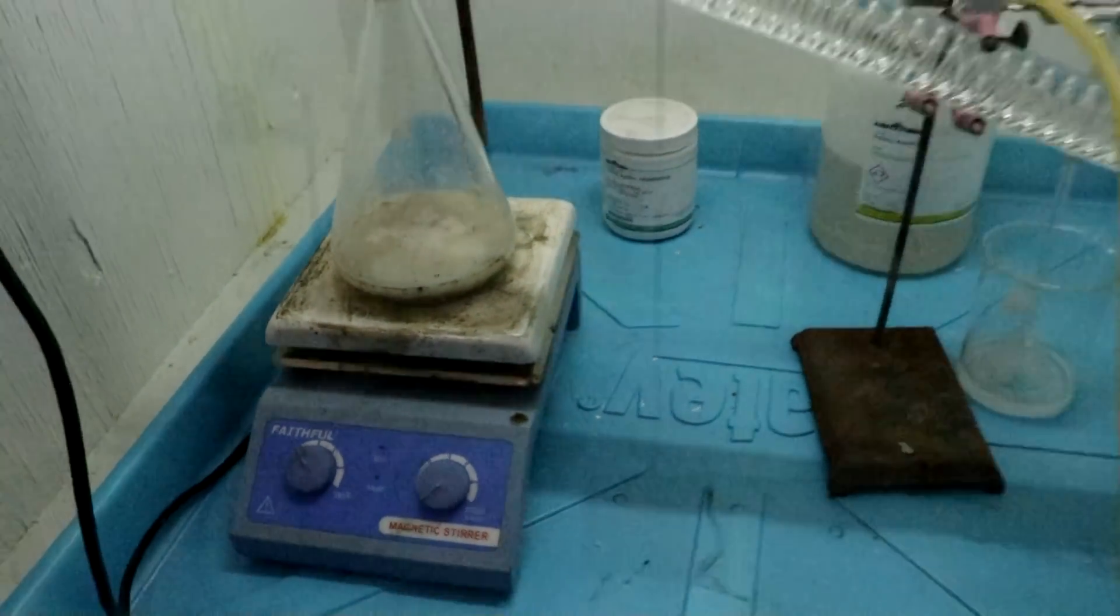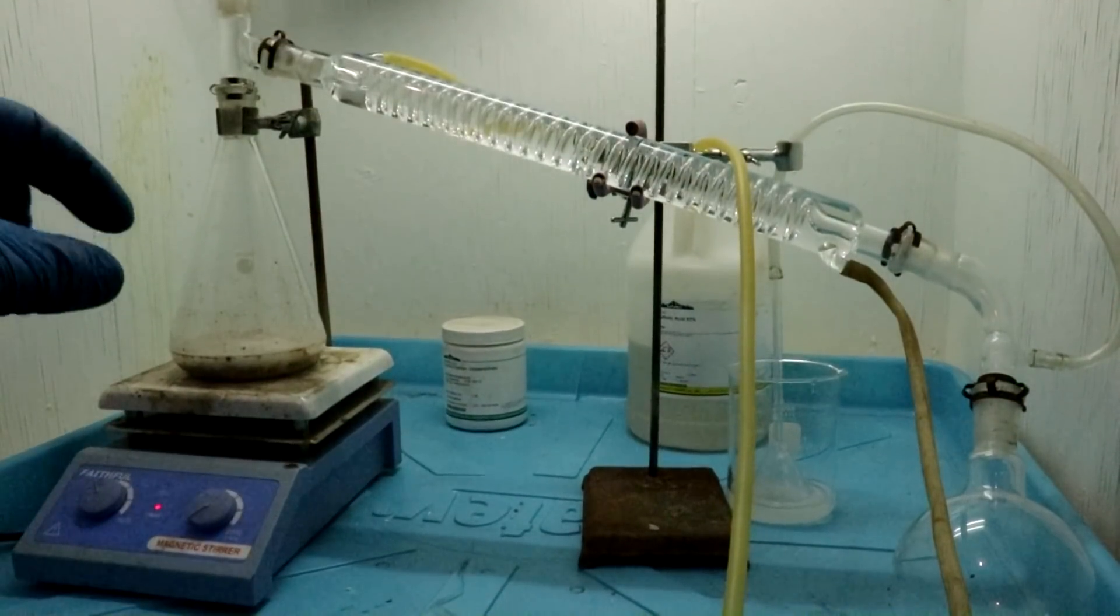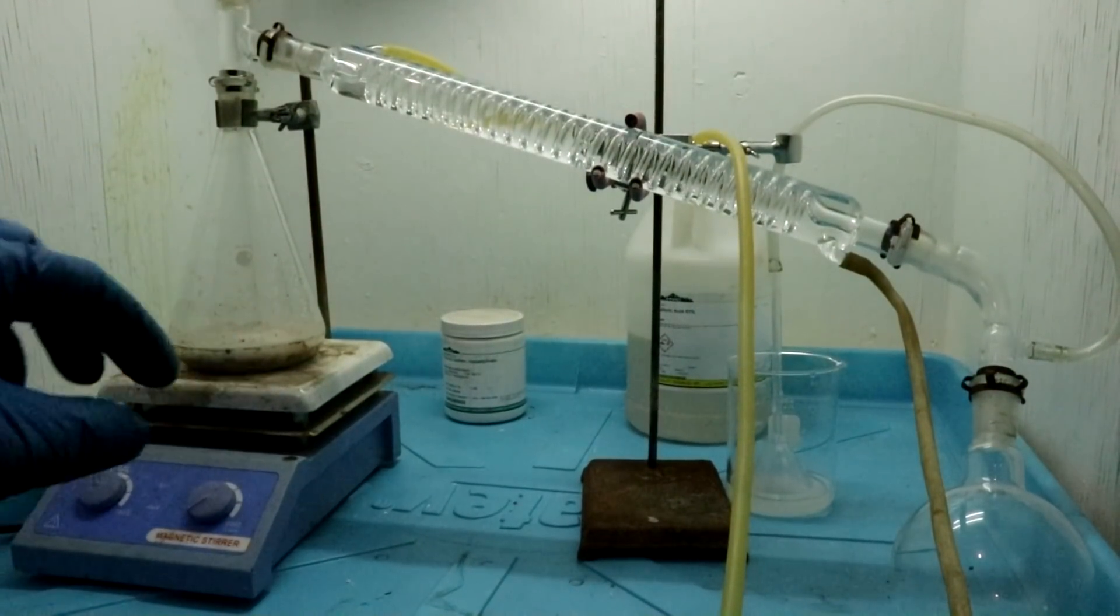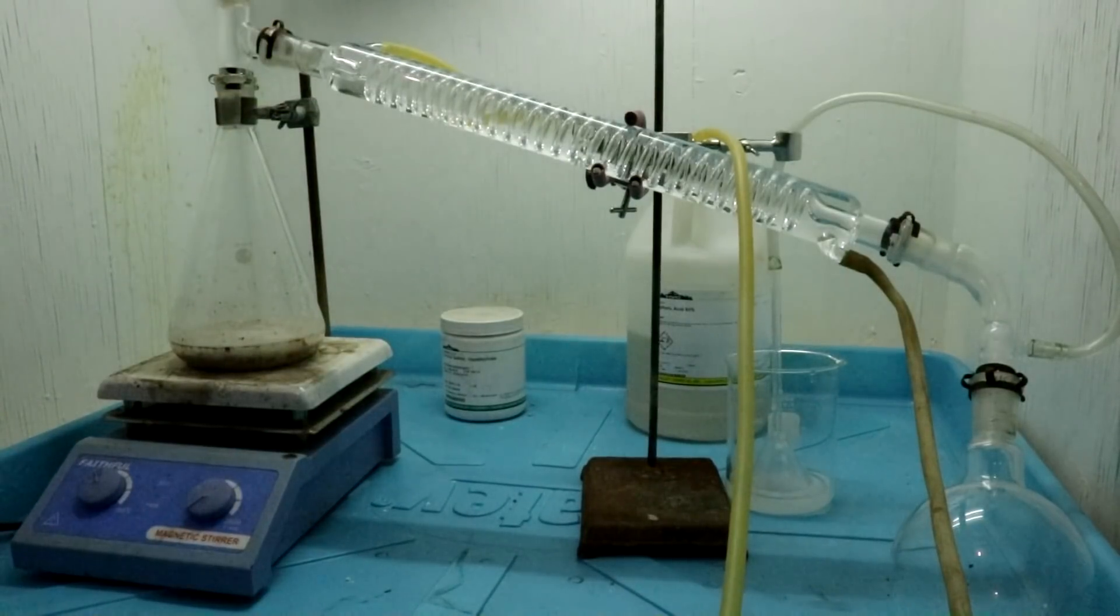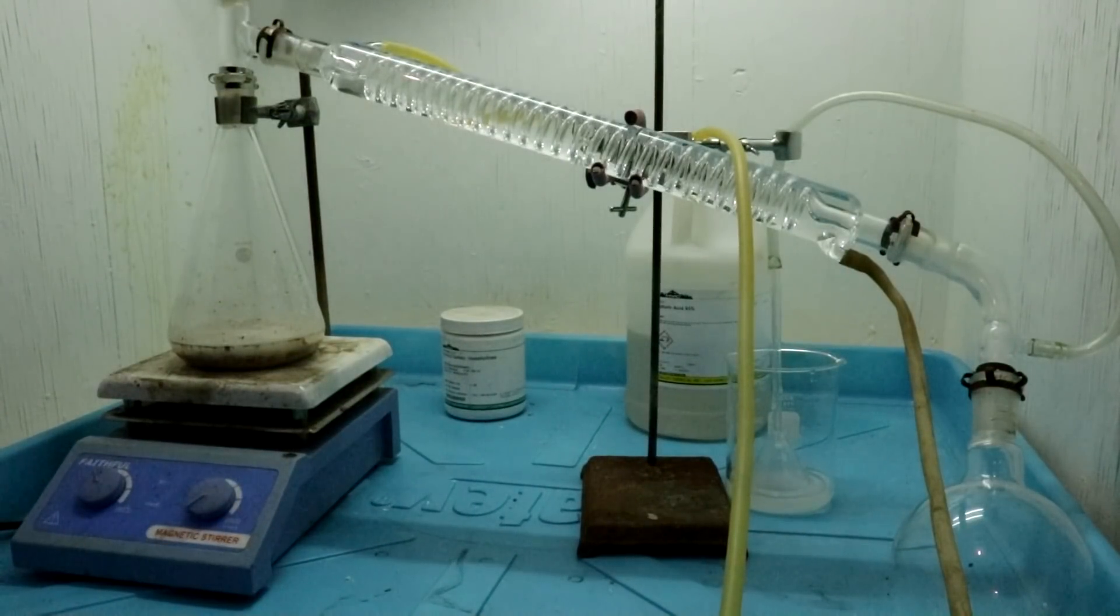Let's turn on the hot plate. It's kind of like ammonia. It's highly soluble in water but once the water's boiling it'll drive it off. So I just gotta wait a little while.